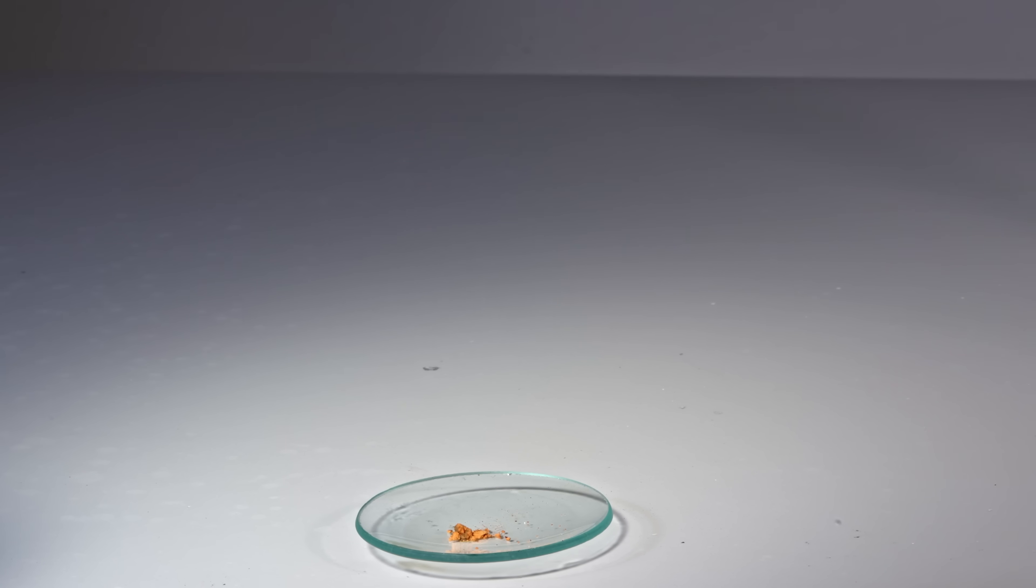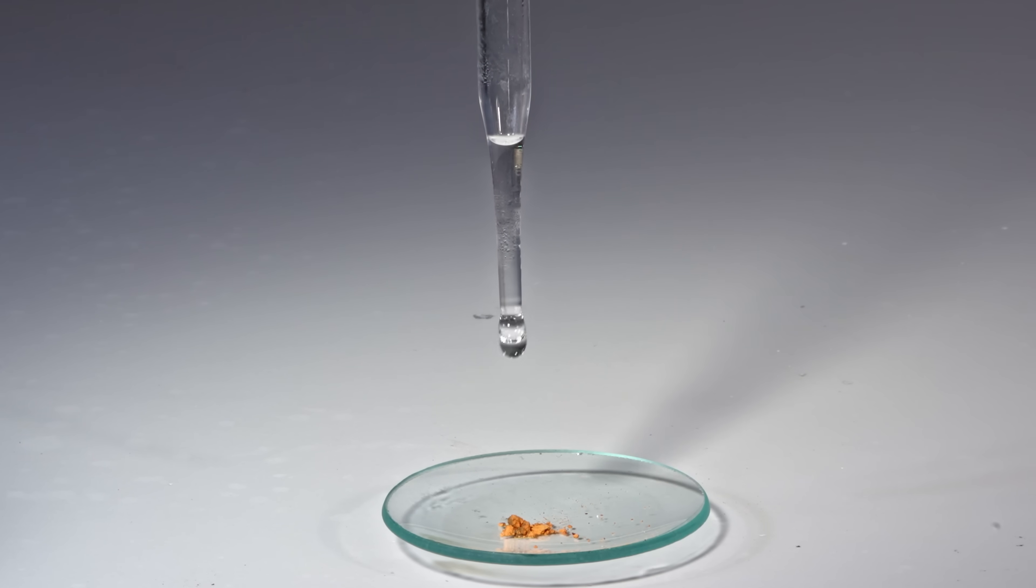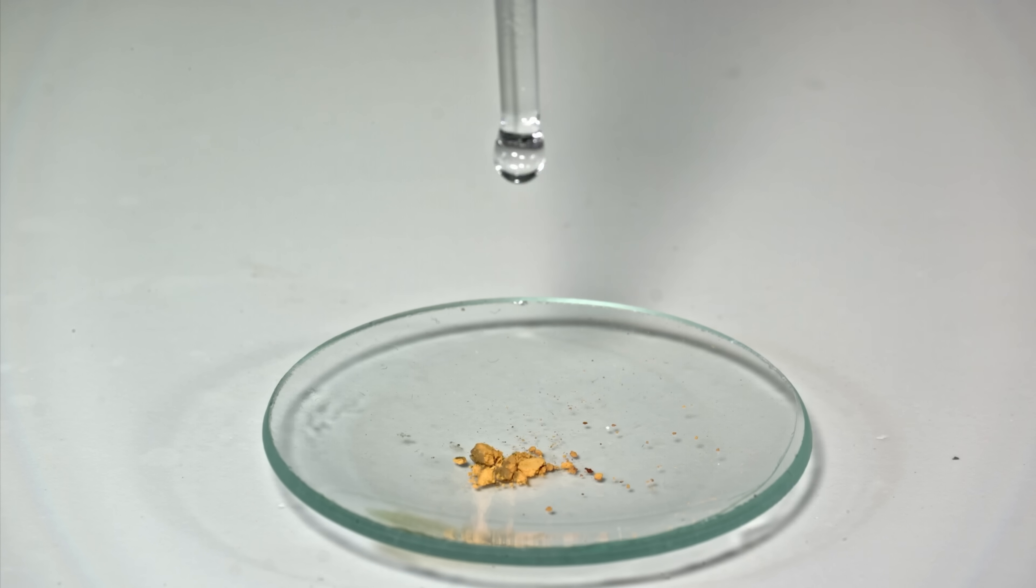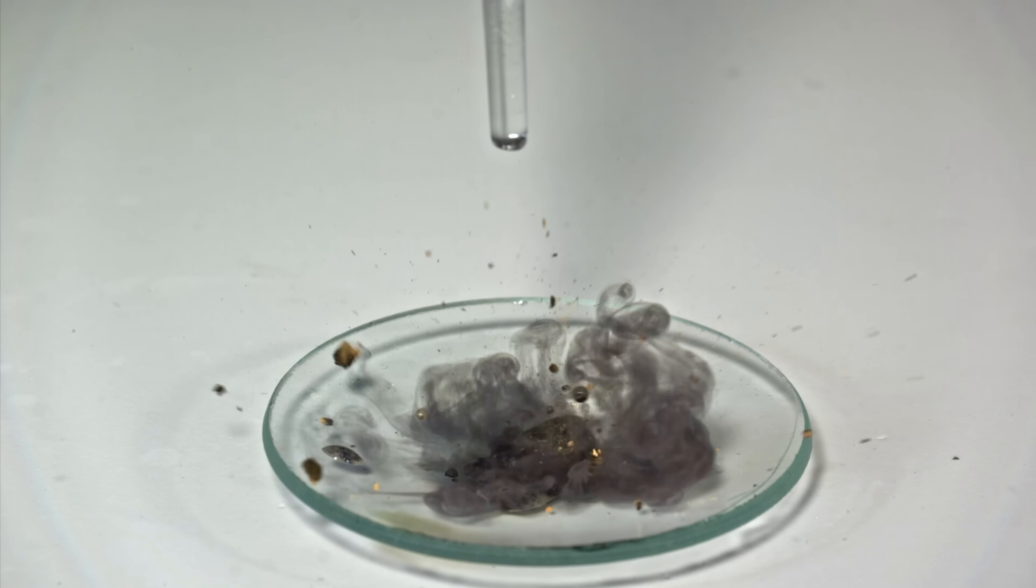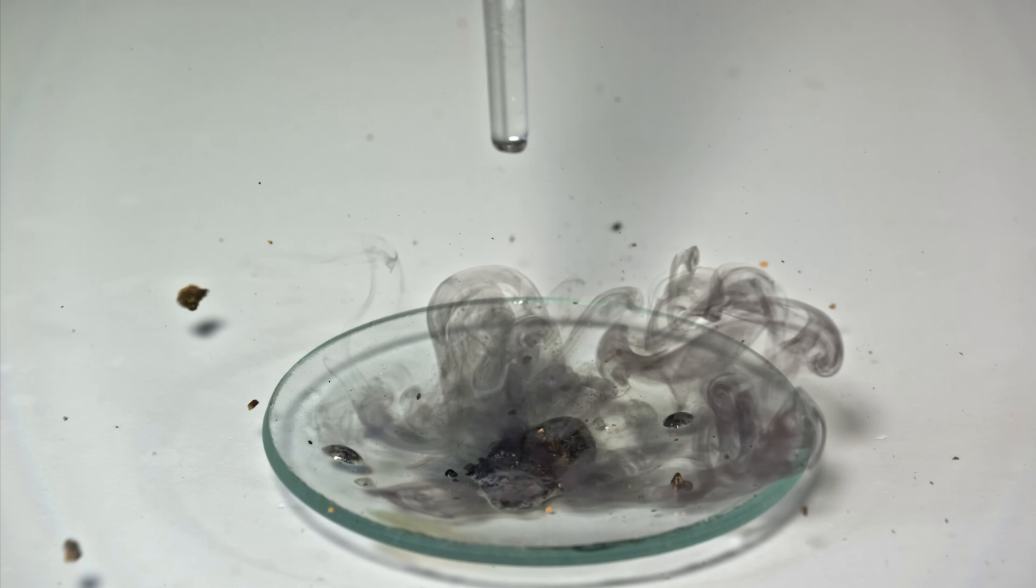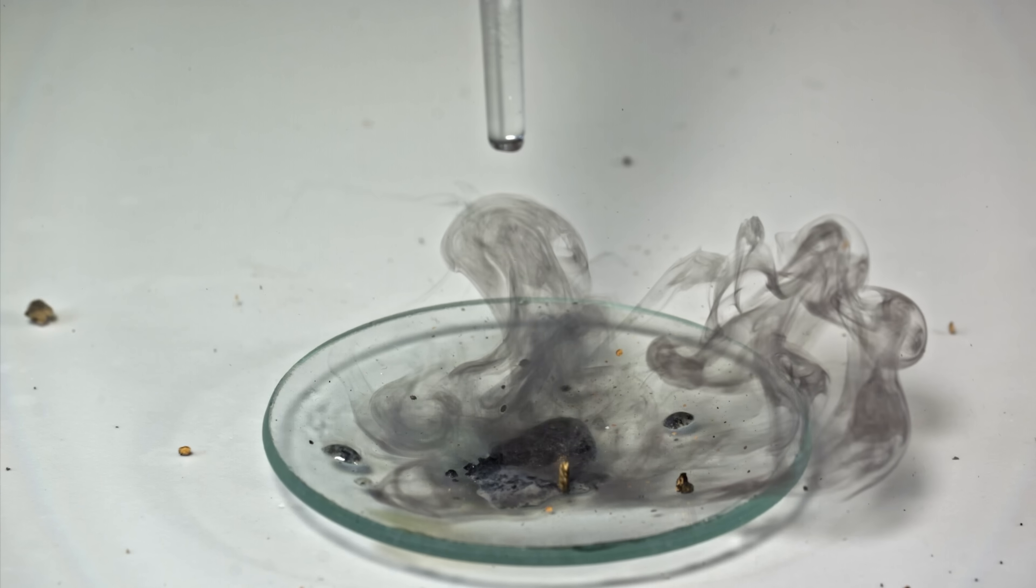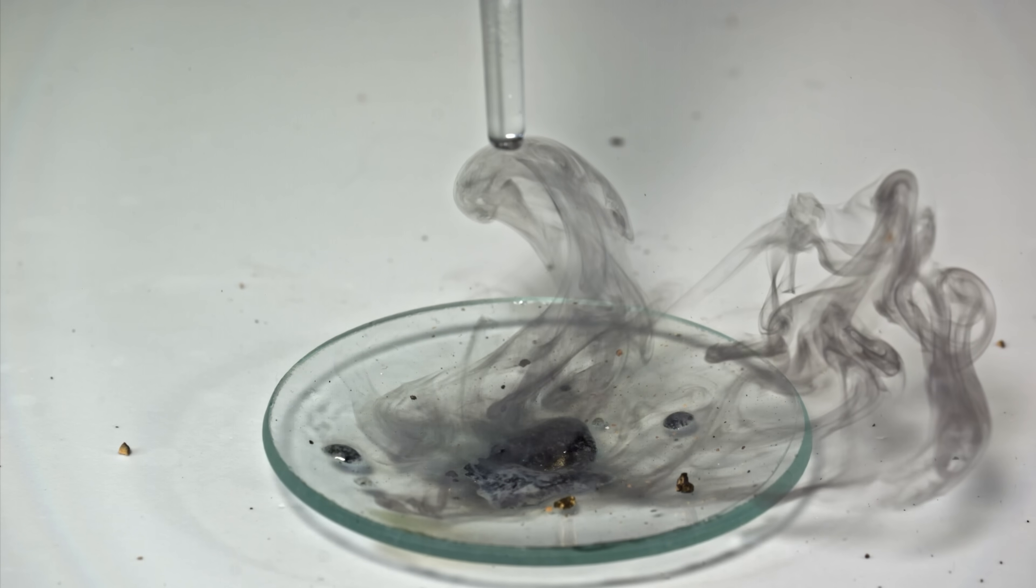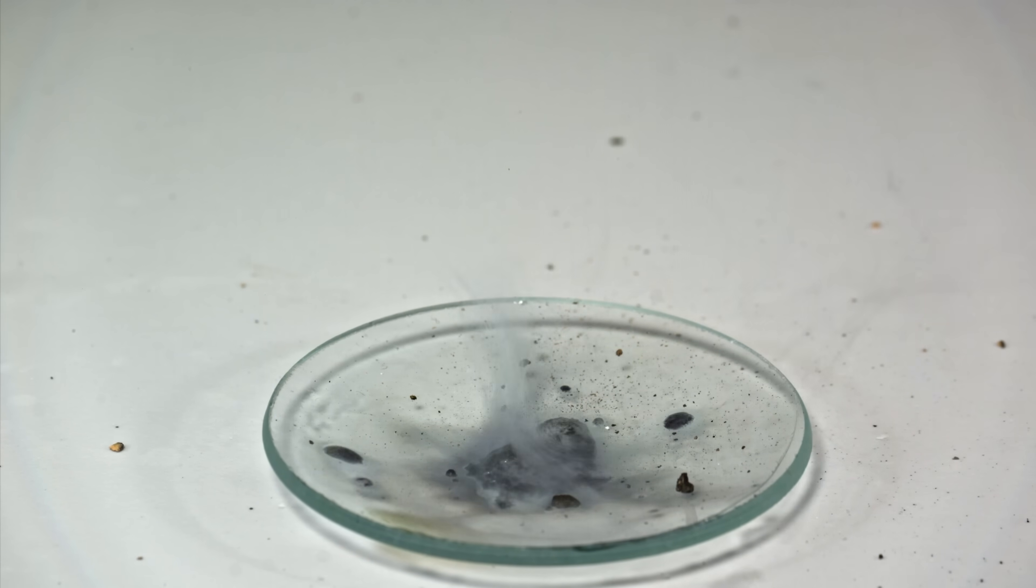And finally, I decided to check whether we would see purple smoke if we added a powerful reducing agent to this substance - anhydrous hydrazine. Interesting, in this reaction we saw black smoke, which can also consist of gold particles, but of a different size.